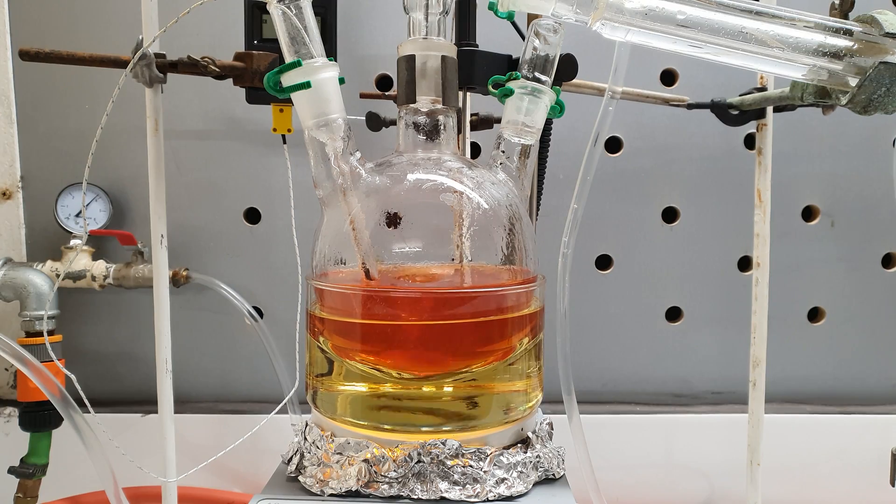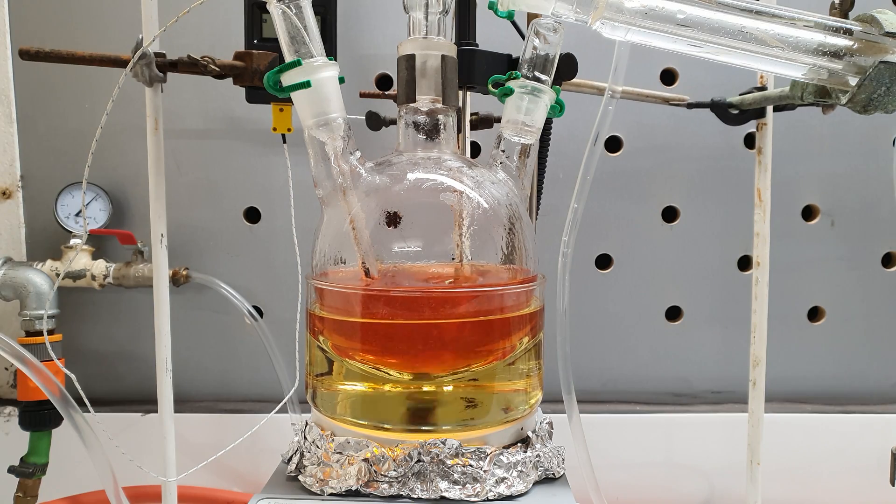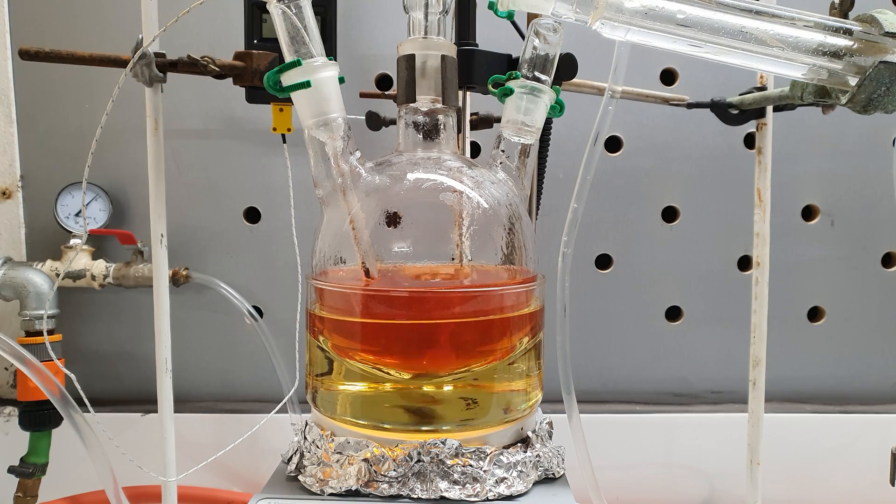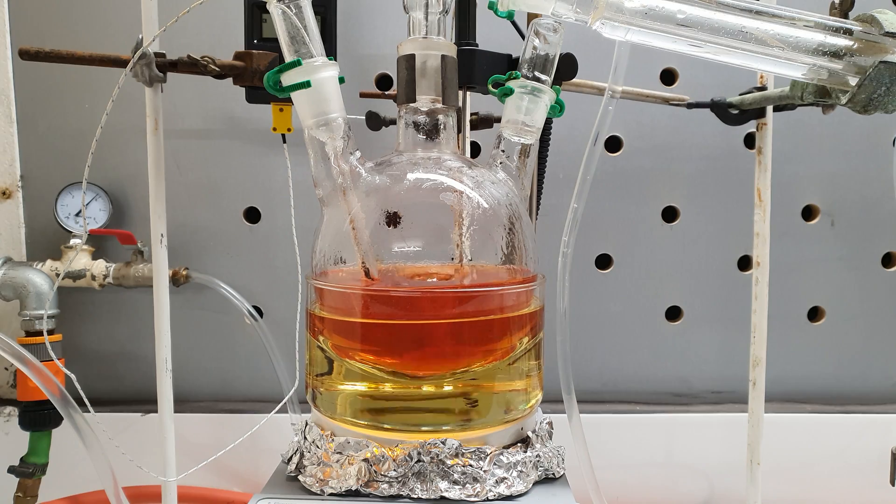When you have a reaction that produces CO2, there's always a chance for the mixture to start foaming over and ruin your experiment. That's why during the whole time I never lost the reaction from my sight and raised the temperature very slowly.